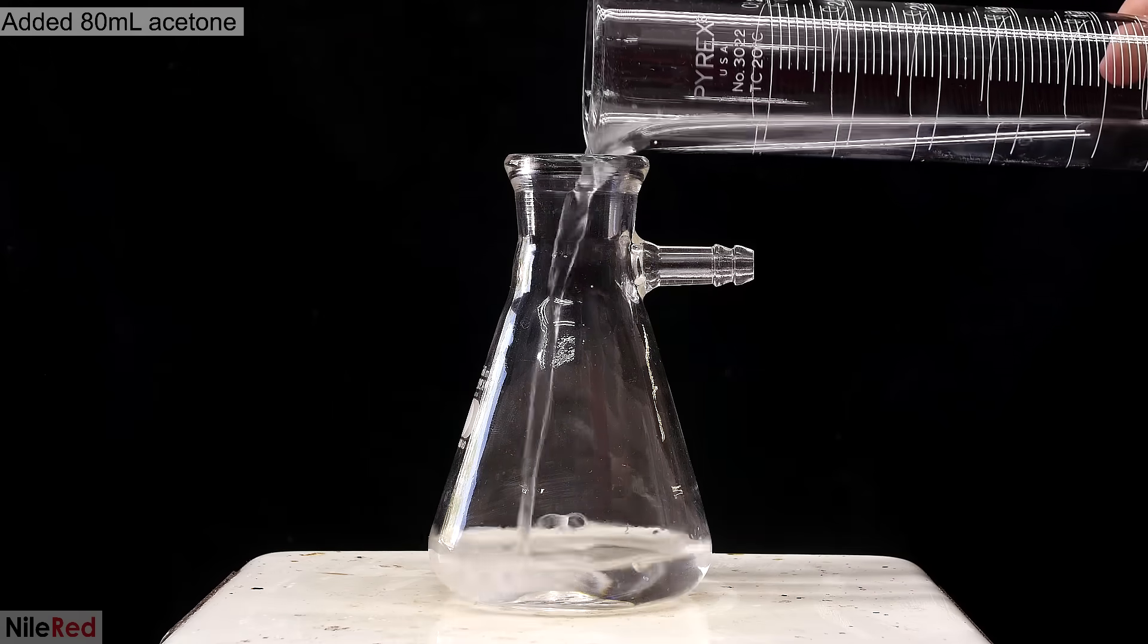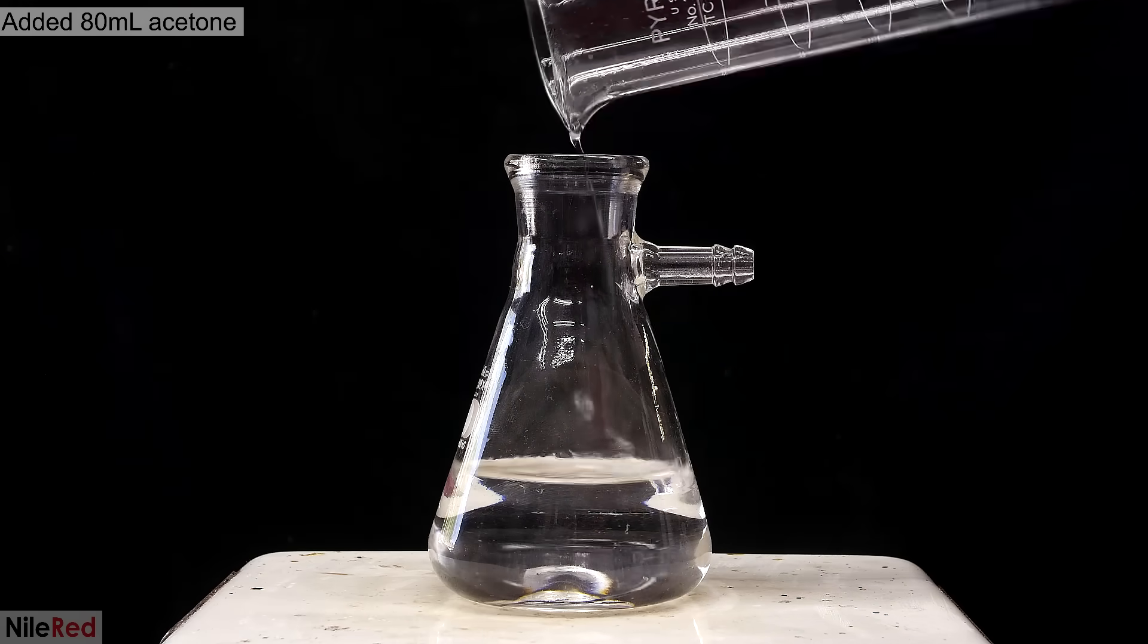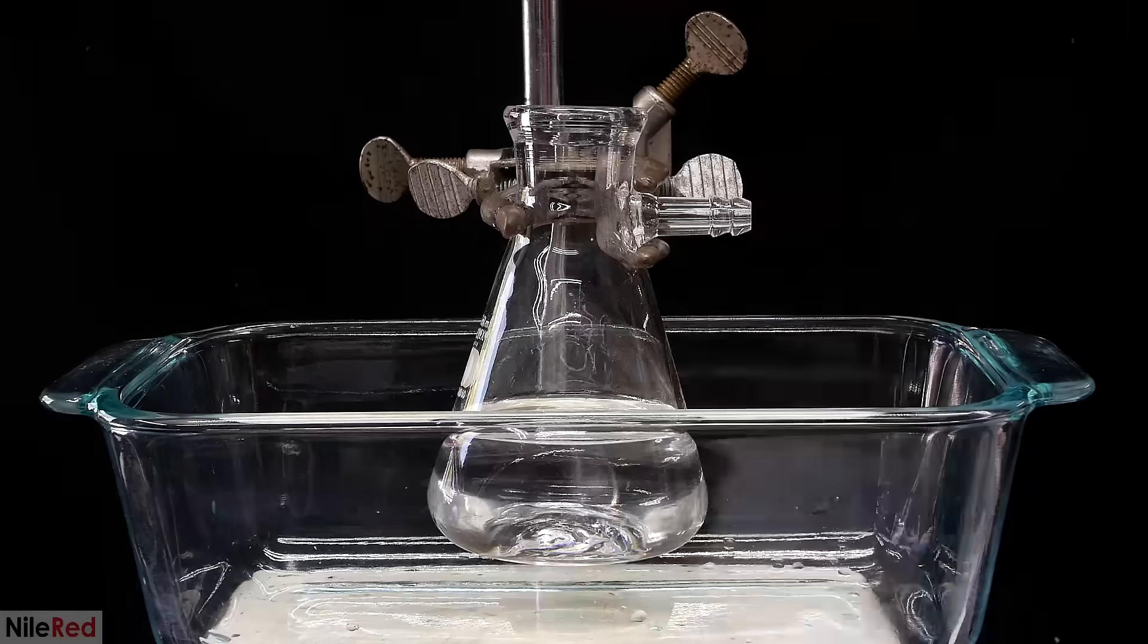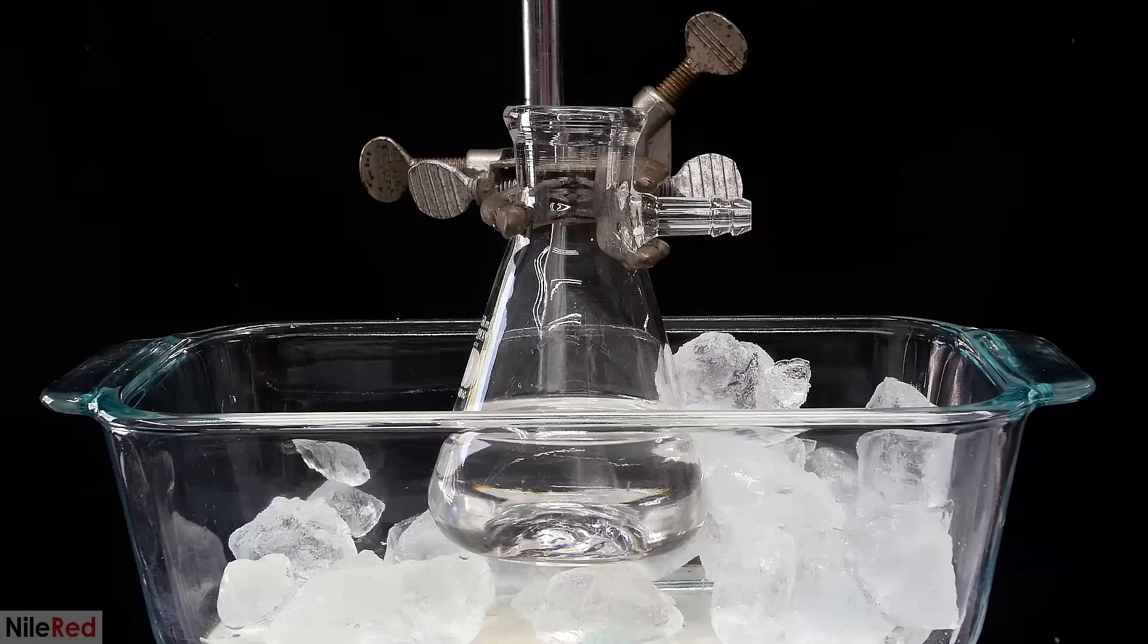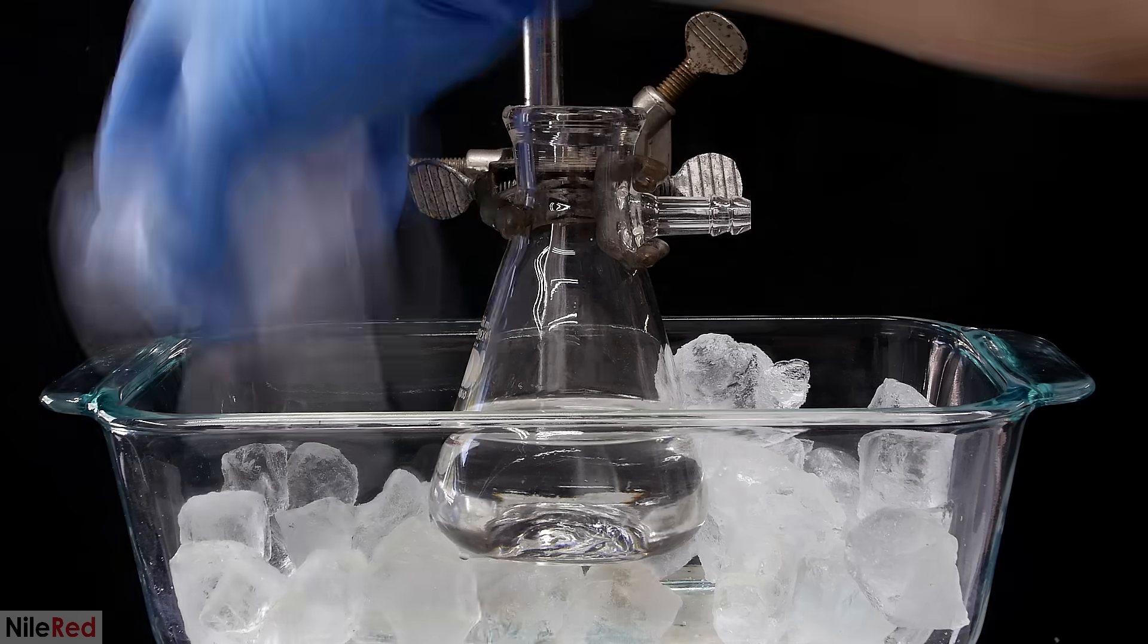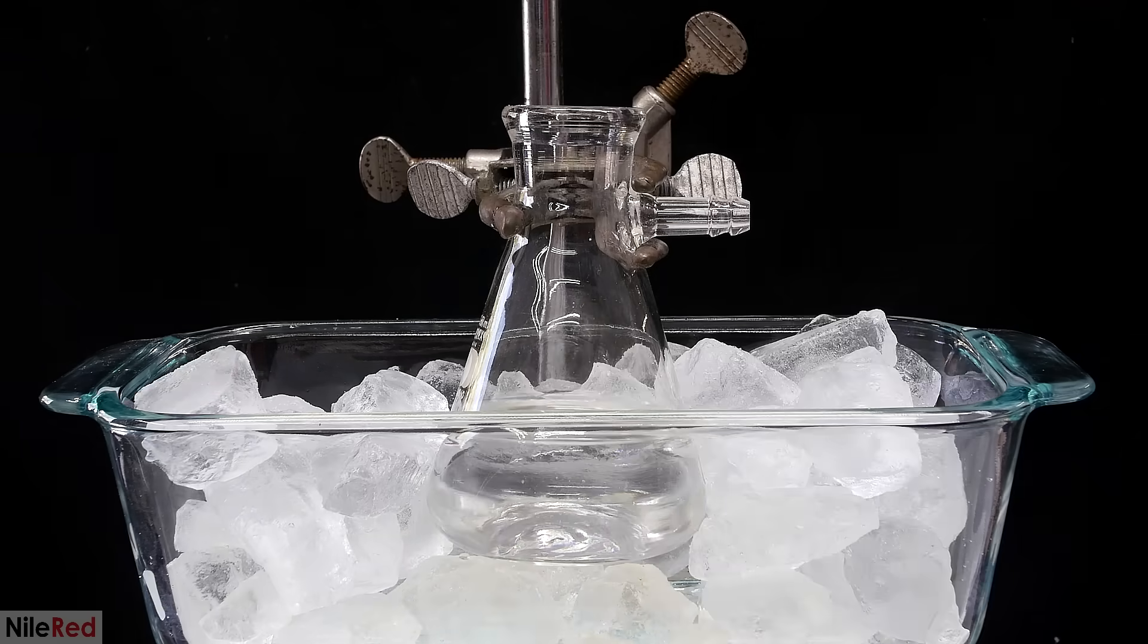I start things off by adding 80 milliliters of acetone to a suitable flask. The acetone needs to be cooled to between 0 and 5 degrees Celsius, and to do this, I set up an ice bath.